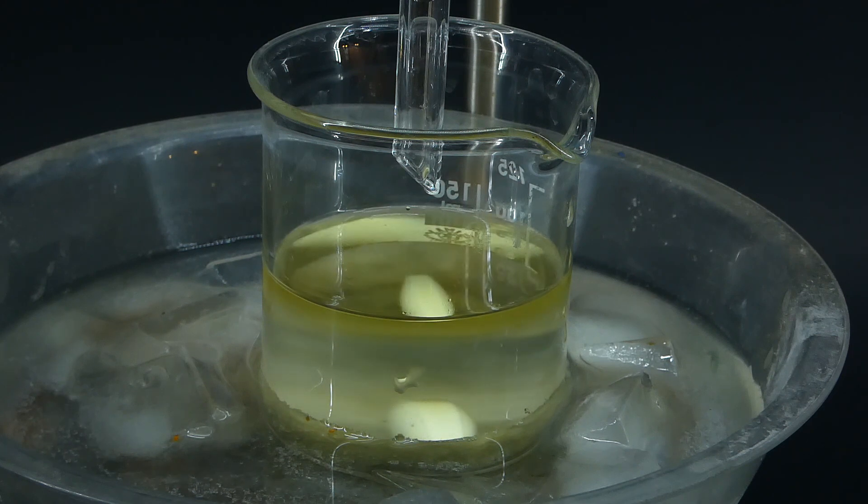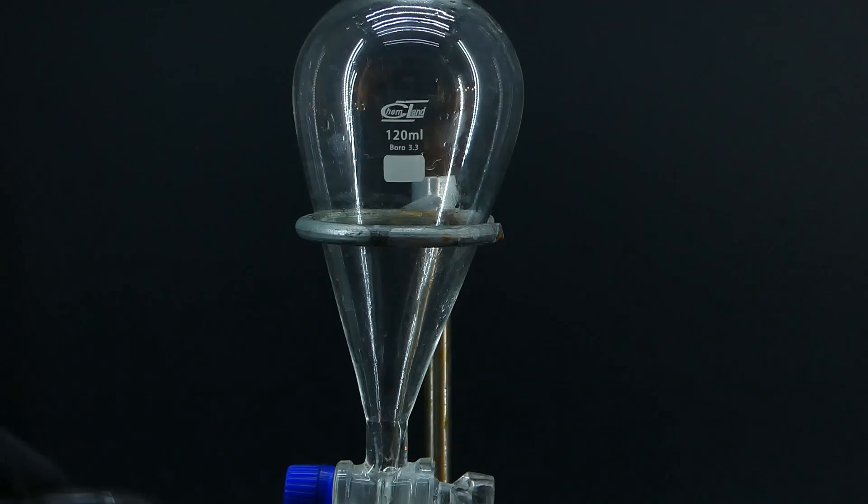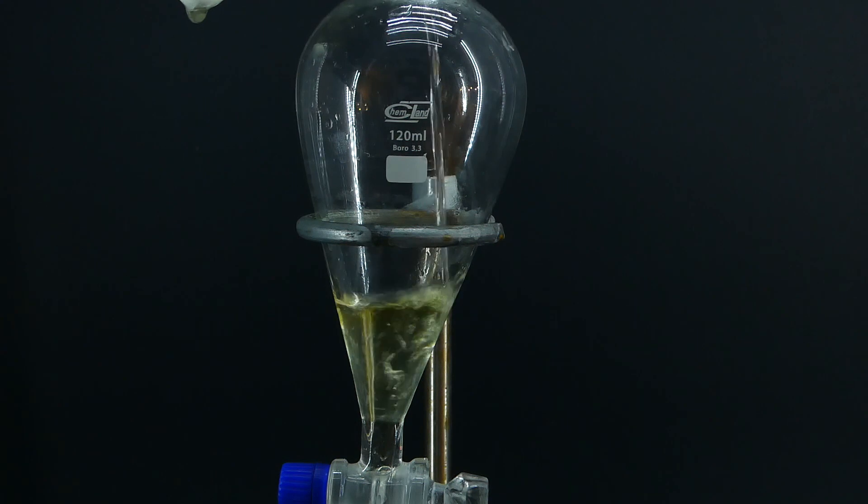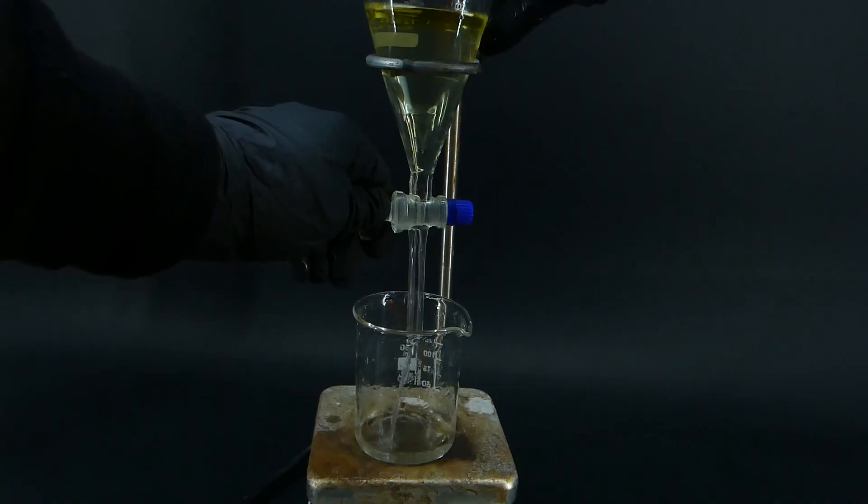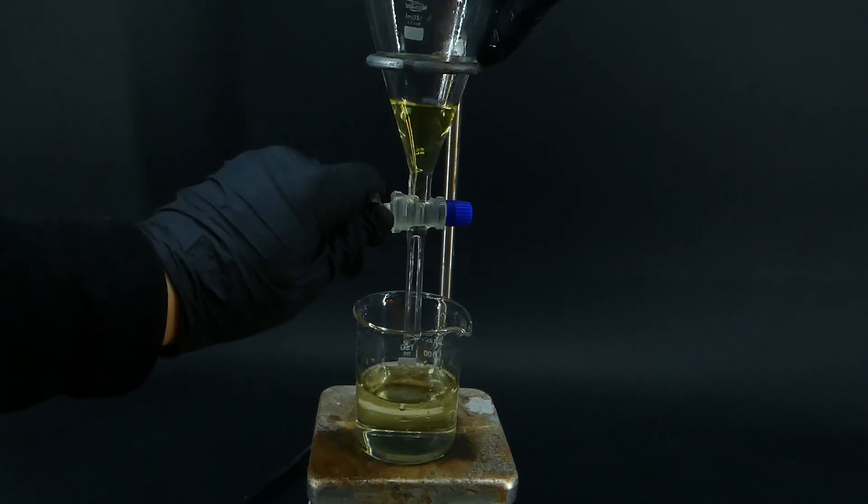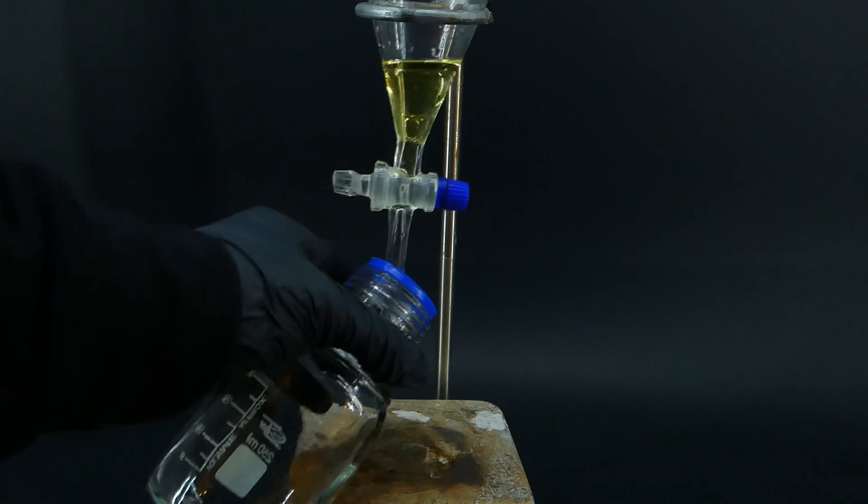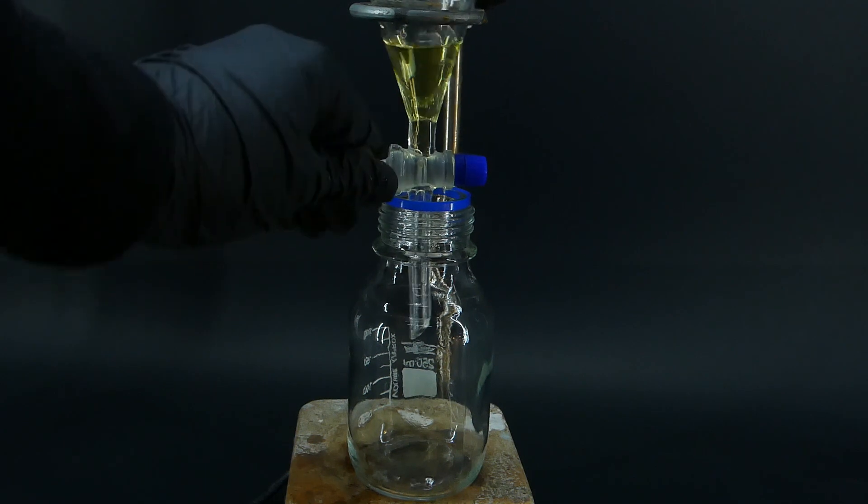The upper one is the isopropyl nitrite, which kinda looks like pee. To separate it, I put the entire mixture into a separatory funnel and slowly drained the water layer. After that, I poured all of the isopropyl nitrite into a bottle. I could do an additional washing step, but I was too lazy and decided not to.